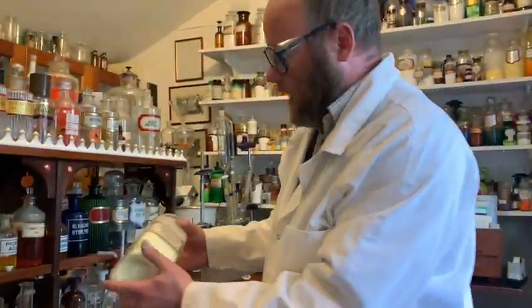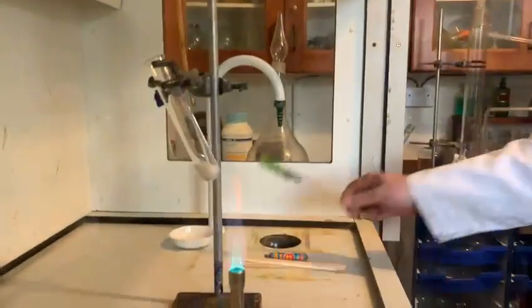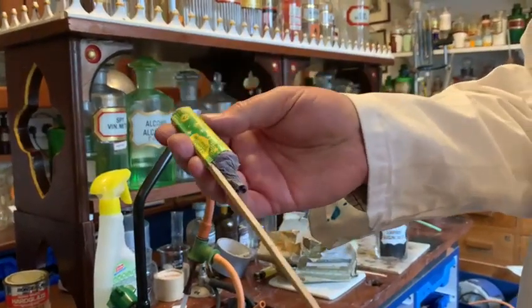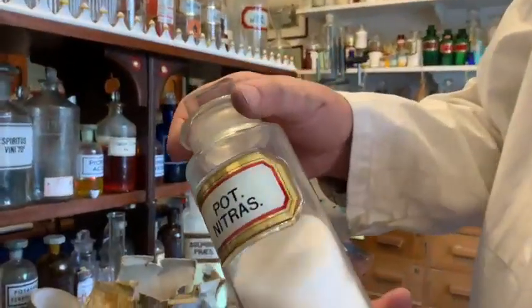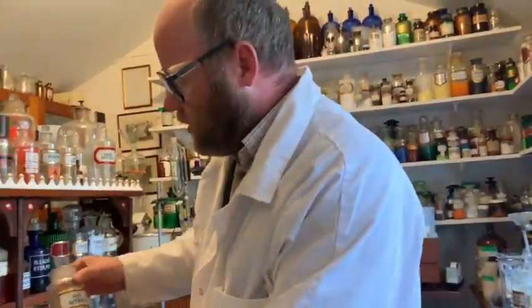One thing that sulfur is used in is gunpowder, and we're going to play about with that later on in the future. I have some lovely little antique Astor rocket — it's about 50 years old, I don't even know if it works. And of course gunpowder is used in rockets and things. One of the components of gunpowder is a substance called potassium nitrate, also known as saltpeter. It's made from dung and urine especially, but this one is specifically pure for medical purposes.